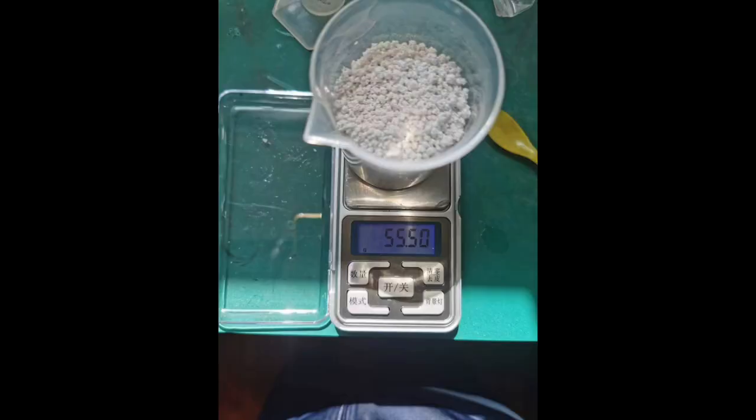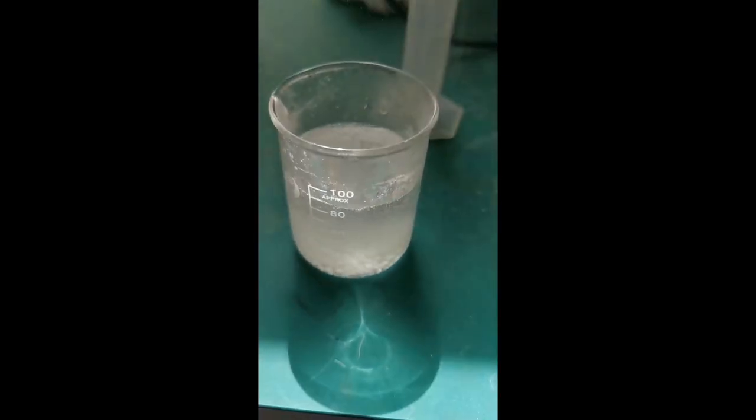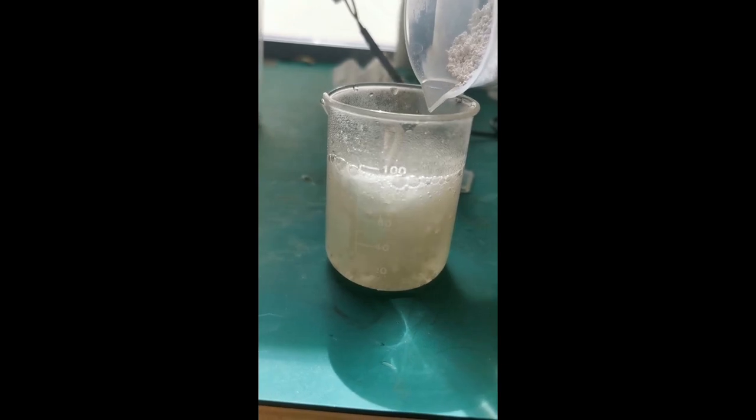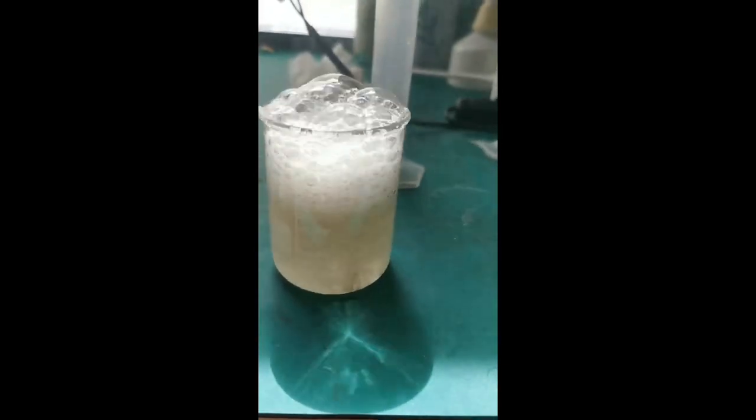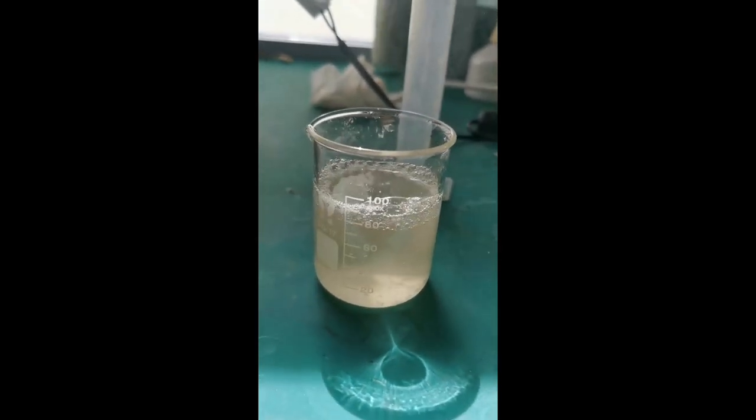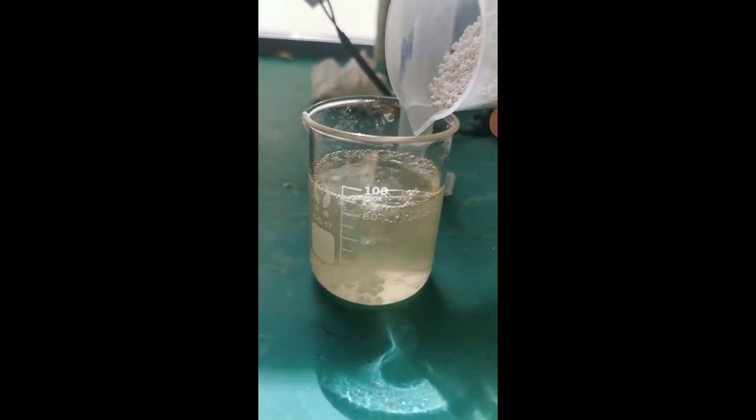I measured out 55.5 grams of anhydrous calcium chloride, which is about half a mole, and dissolved it in 80 milliliters of boiling water. The addition of anhydrous calcium chloride to water is extremely exothermic, and caused the solution to boil. This actually further increases the solubility of the salt, which makes the dissolution very fast. In fact, I didn't even have to stir the solution to dissolve all of them.